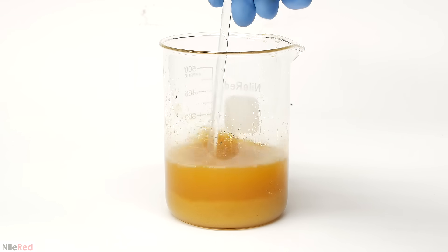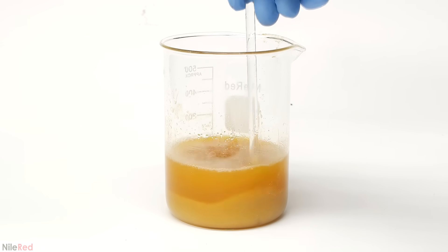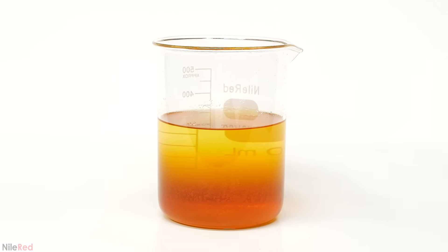I added a random amount that I felt was appropriate, mixed it around for about 30 seconds, and then filtered it. By the time I was done, a lot of solid had formed, which I initially assumed was urea. I figured that because the ethanol was cooling down, the solubility of urea decreased, and some of it fell out of solution.